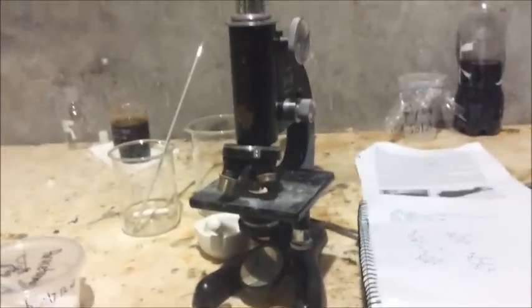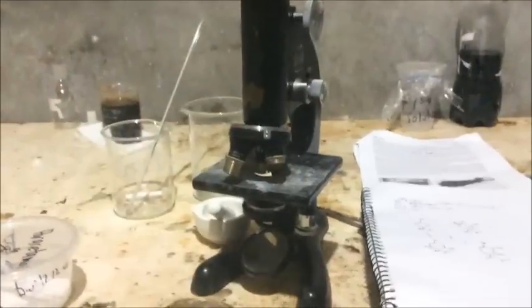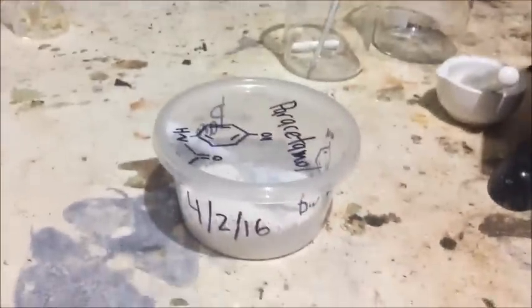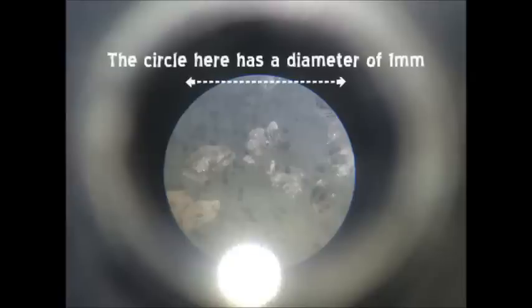This is a microscope that belonged to my grandpa when he was a vet in vet school — a long time ago. I took some photos of the crystals, I'll show you them now. Yeah, they're nice crystals.